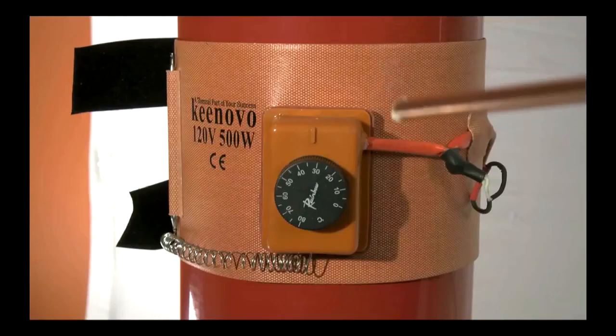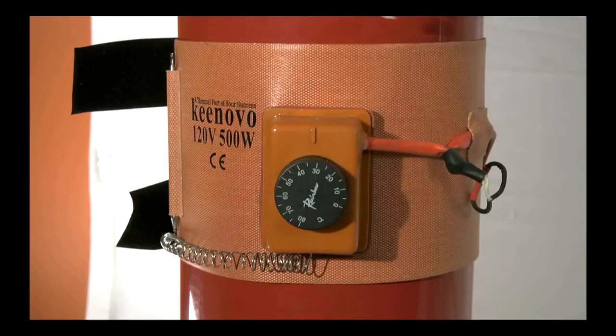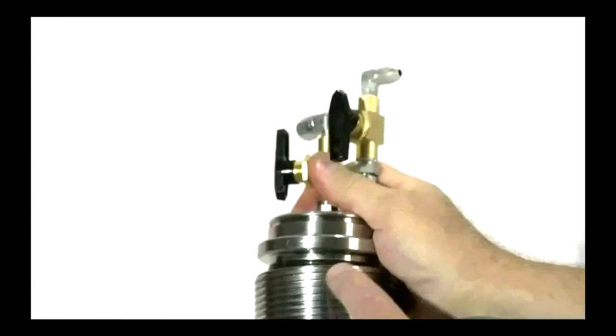The heater is set between 30 and 40 Celsius to generate pressures between 900 and 1400 PSI. The heater is mounted snugly to the tank.